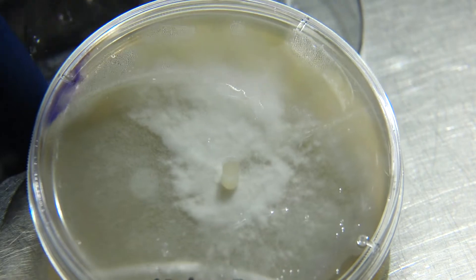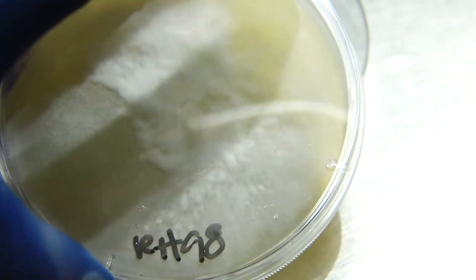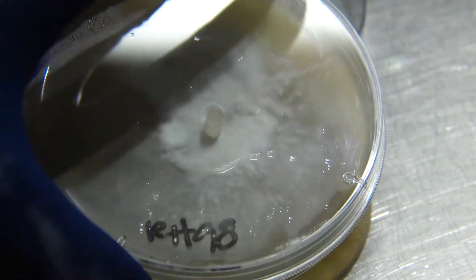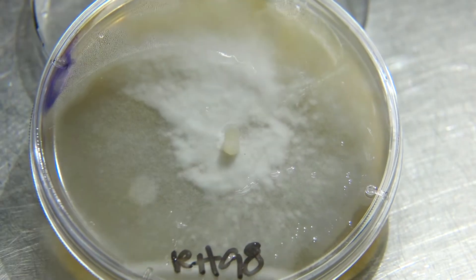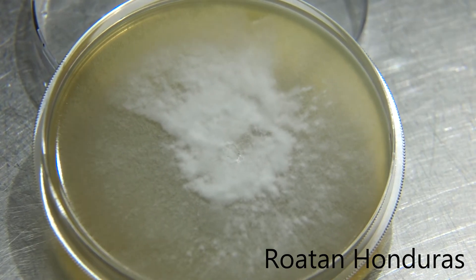Up next we have our Roatan Honduras. These colonies are going crazy — very nice growth, not uniform in the slightest, but we can see a lot of tomentose growth and we're starting to see some of the rhizomorphic growth as well.